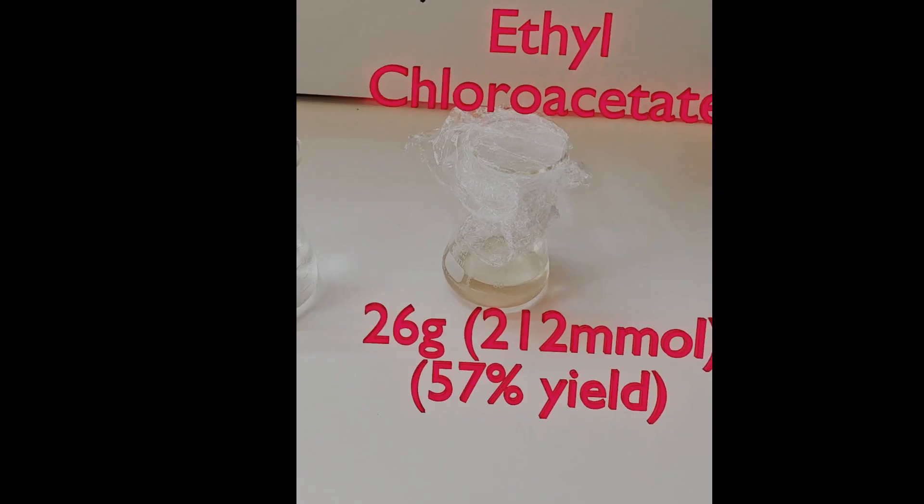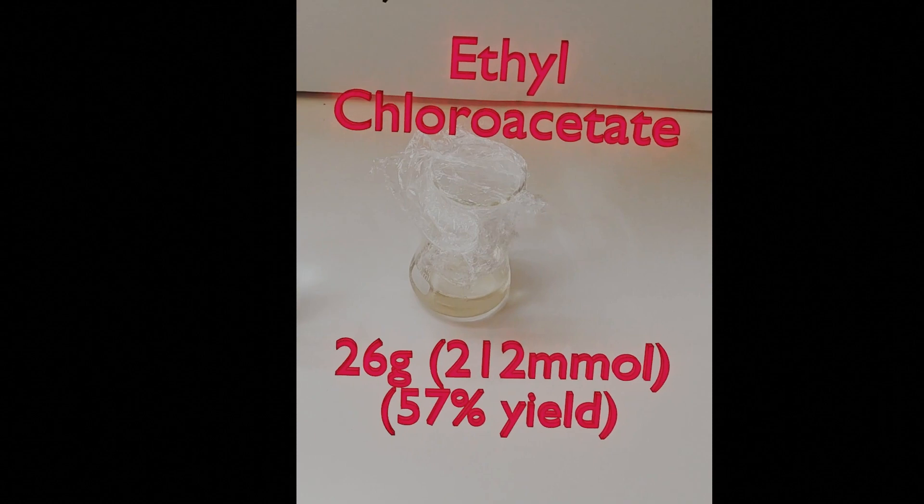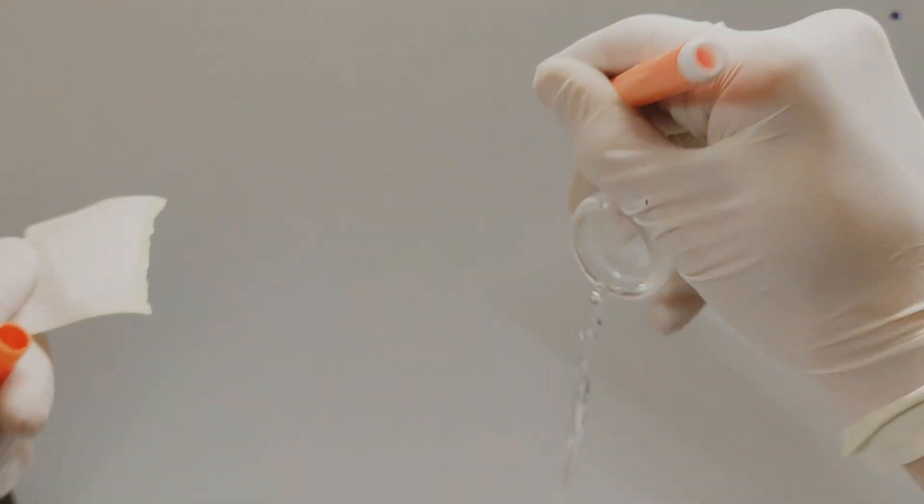Our yield is 26 grams of product, meaning 57% yield, which is okay considering that I spilled some while working with it.